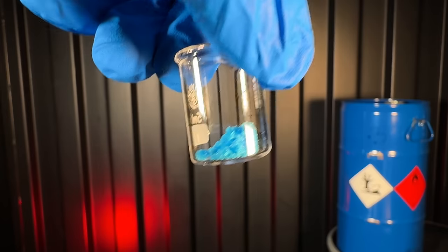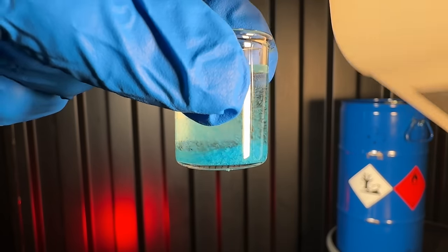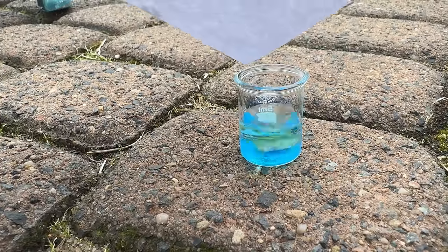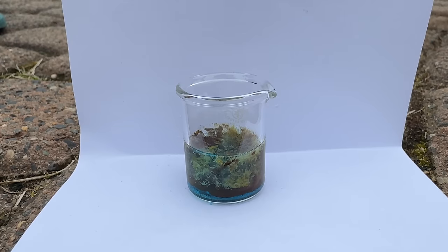And there it is: potassium cyanide. I ended up getting 104.3 grams of cyanide, which is actually kind of good. This is an 85% yield, and I'm happy with this. I now got about 260 grams of cyanide in total—it's going to last me years. This is copper sulfate, which I dissolved in water. It reacts with cyanide to form copper cyanide and dicyanogen, which is a gas that escapes.